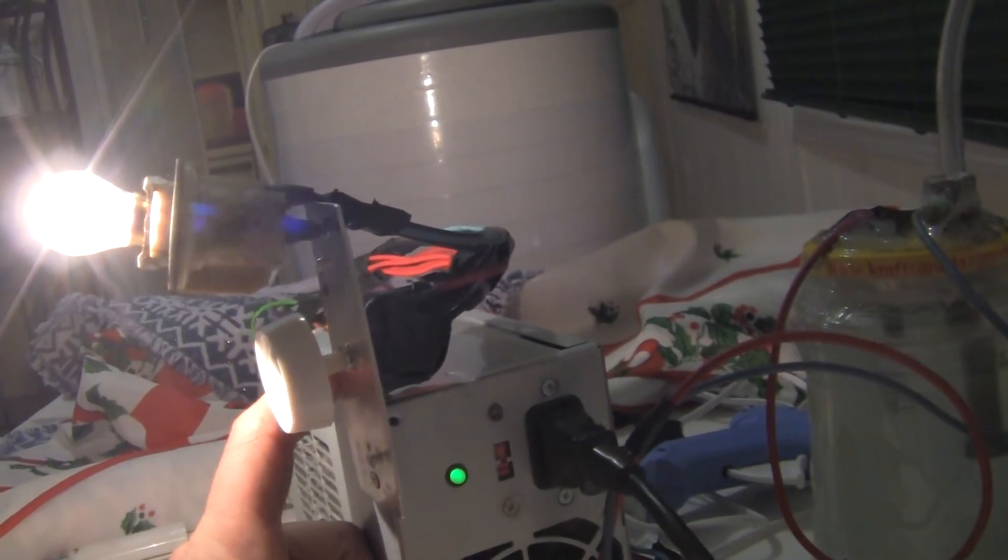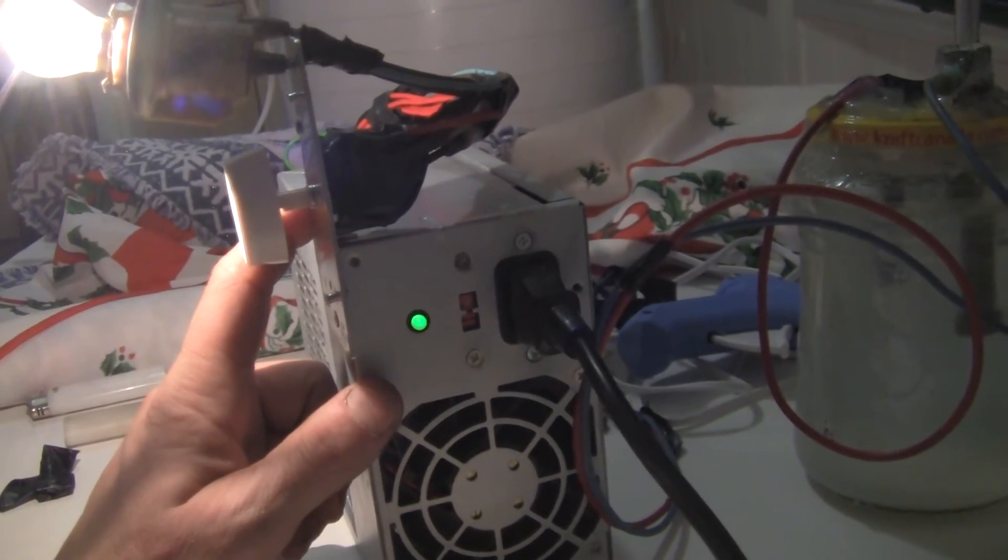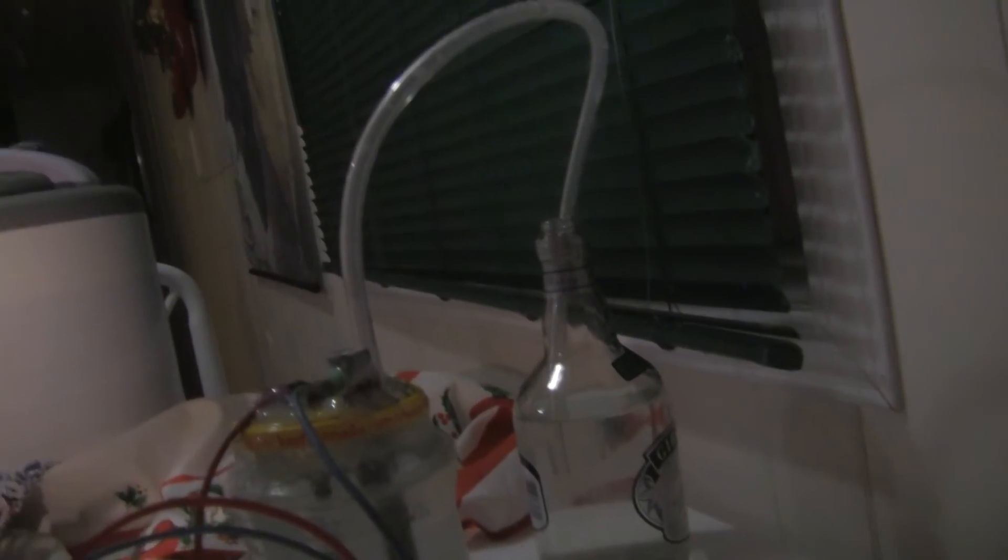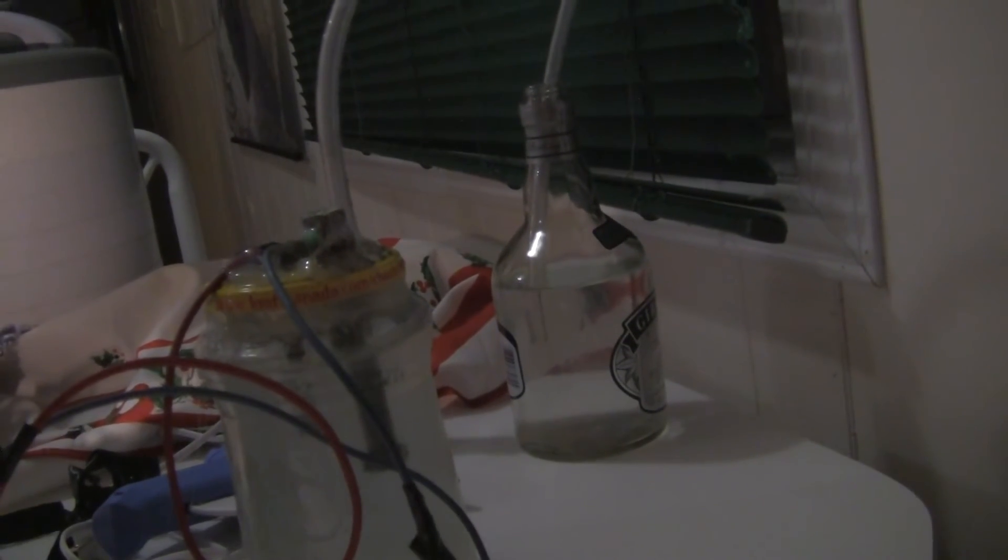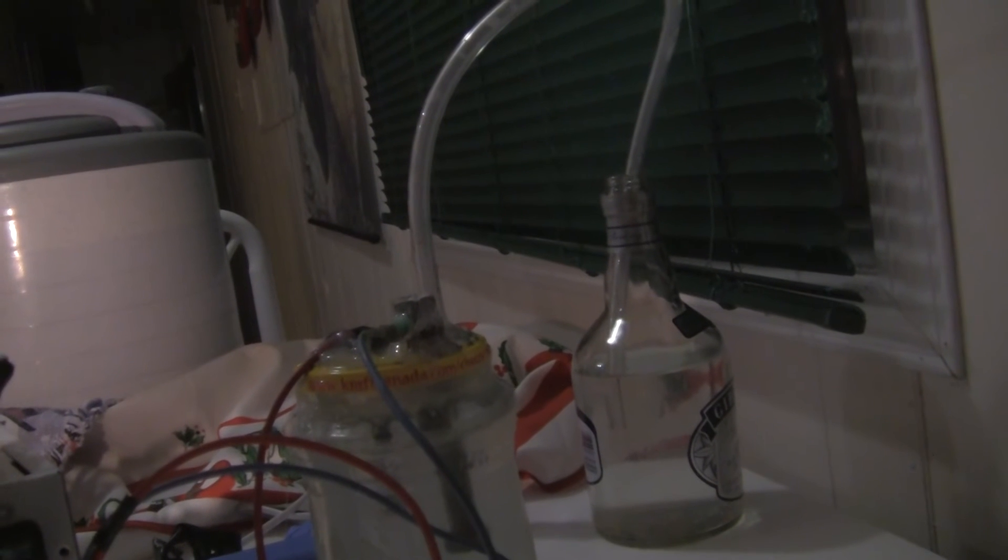So yeah, curious about the scrubber. Just sodium something or other mixture, lye, caustic soda, another name for it. And essentially running chlorine through it, as this is doing, to scrub the chlorine out of it so we don't get chlorine gas into my house.